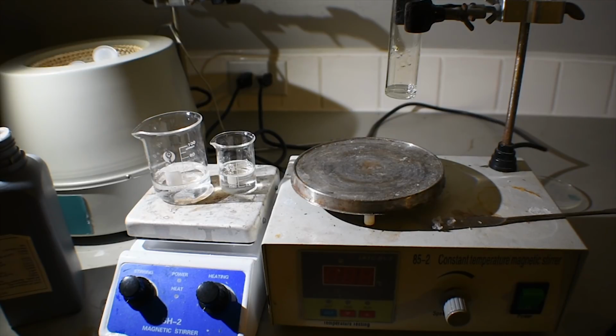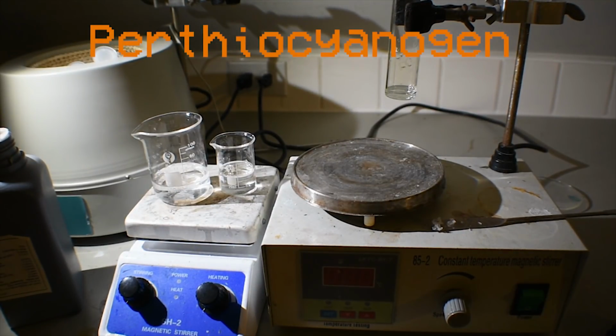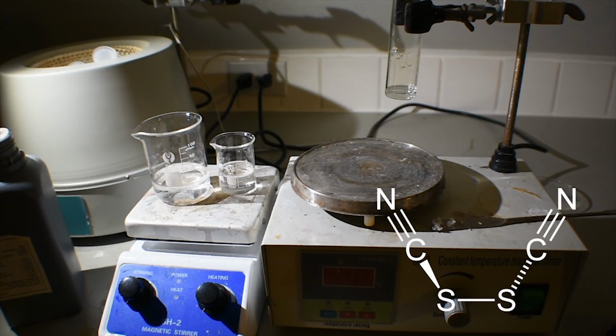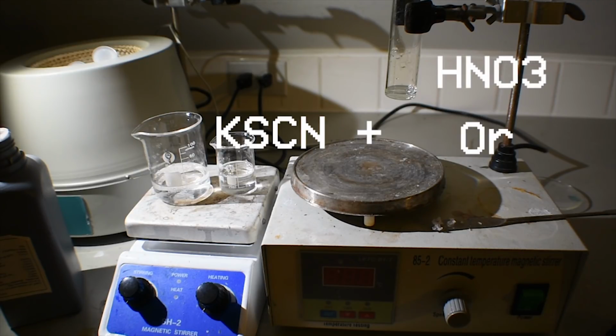Back to another video. Today we're going to be looking at a compound called perthiocyanogen. Perthiocyanogen is a derivative of thiocyanogen, which is a very unstable compound. Perthiocyanogen is formed by the oxidation of potassium thiocyanate by either dilute nitric acid or chlorine.